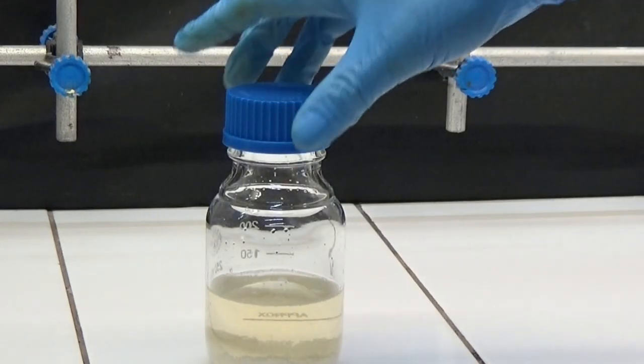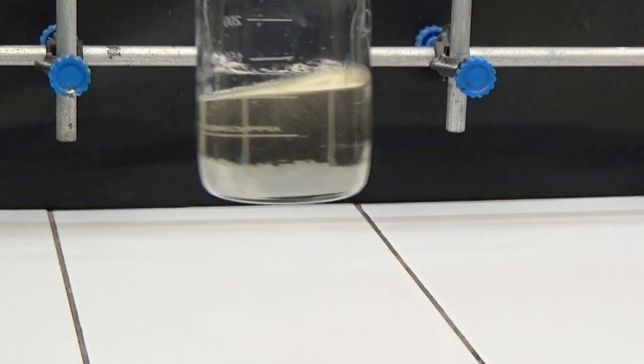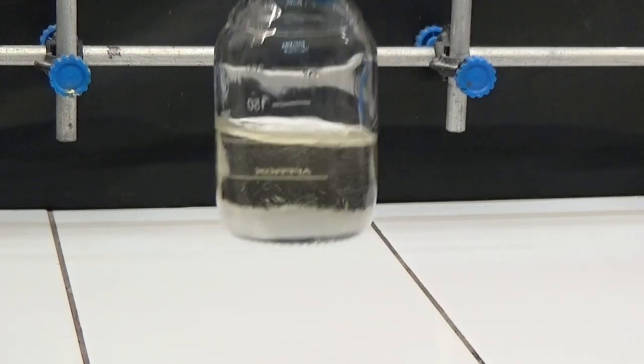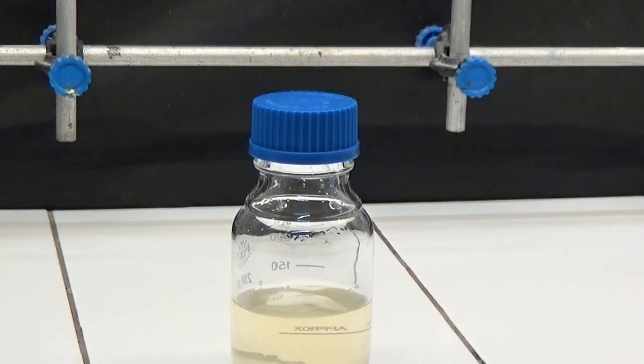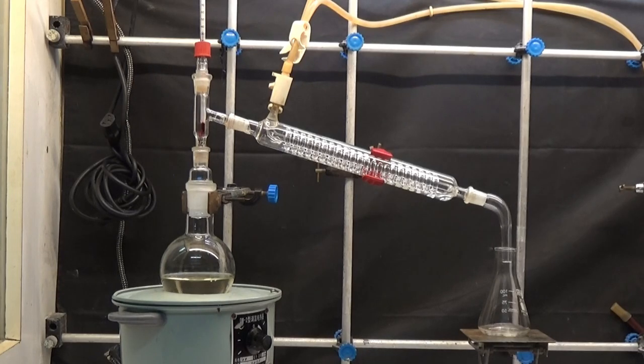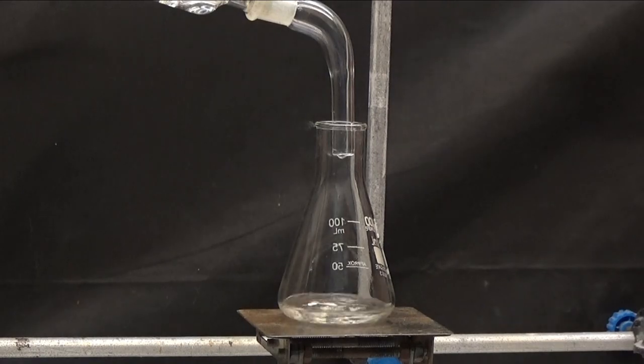Leave in place for 12 hours. Filter and distill the ether until the volume is 20 milliliters.